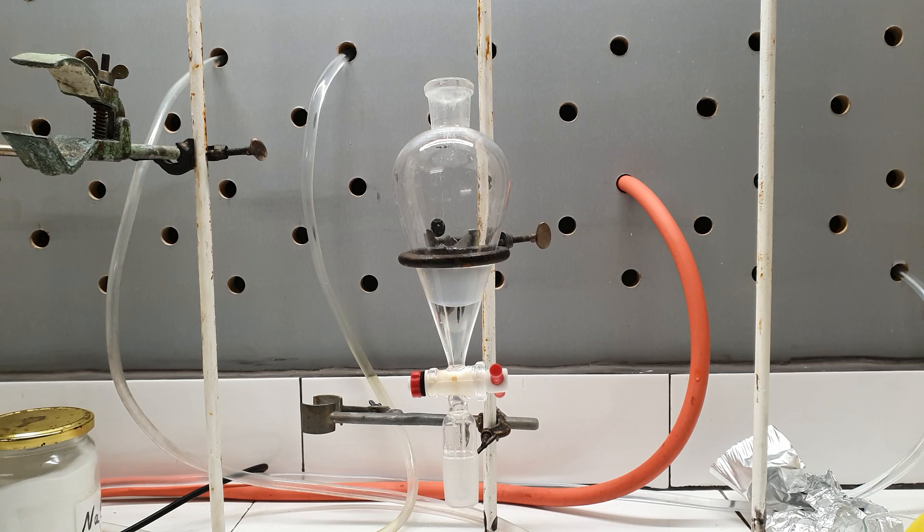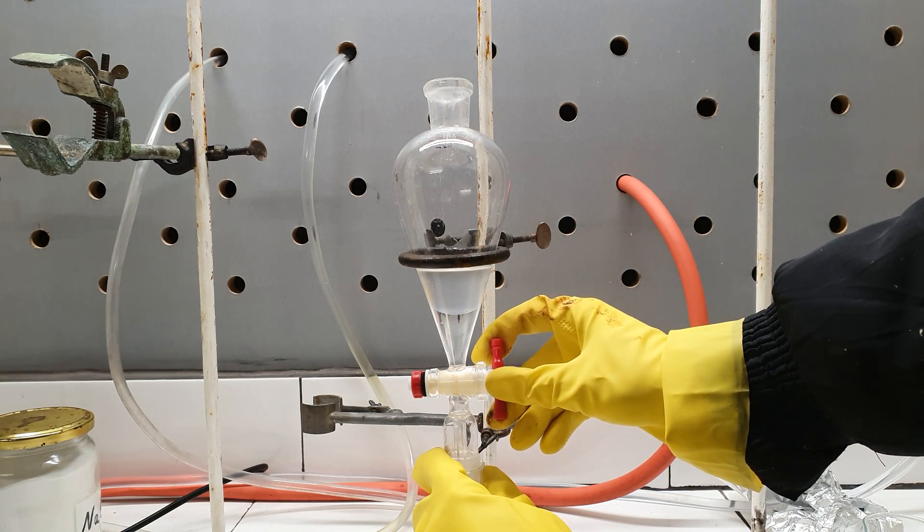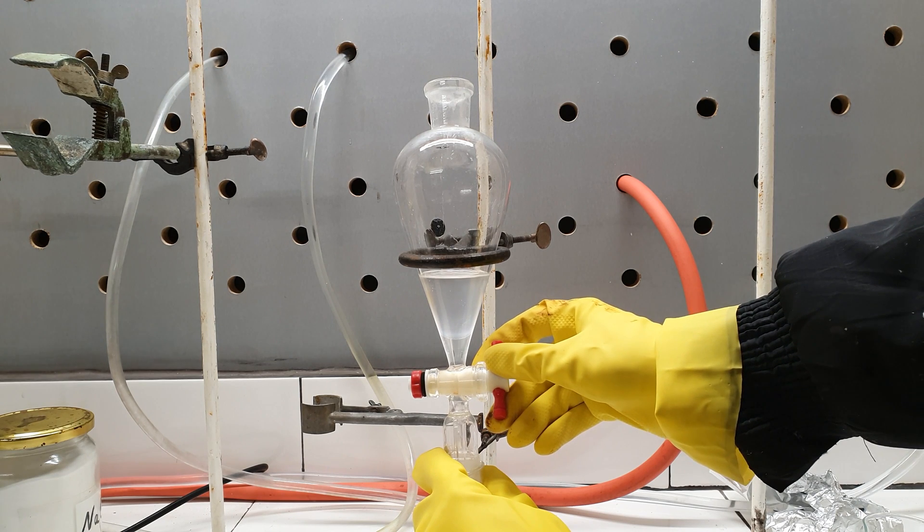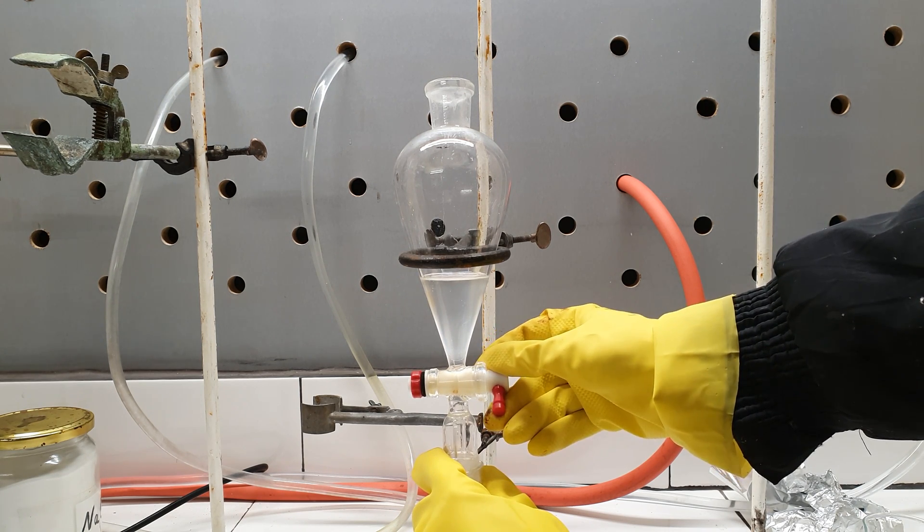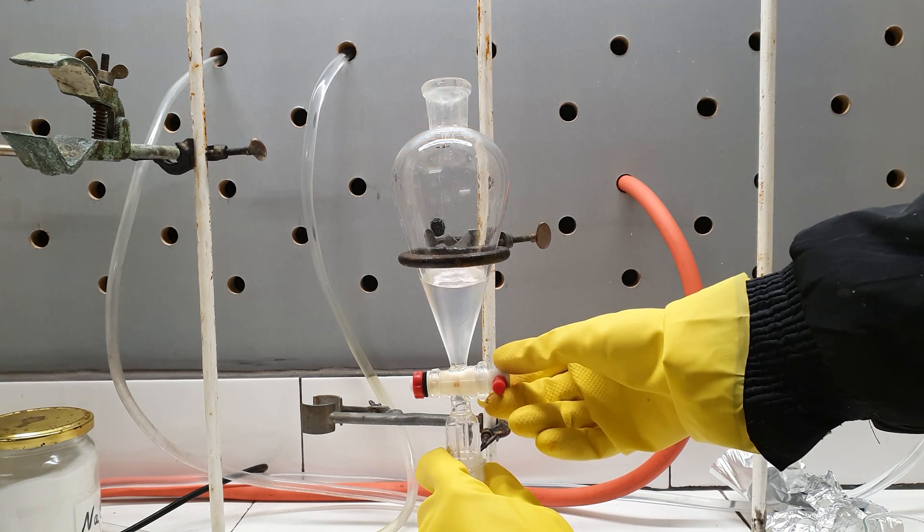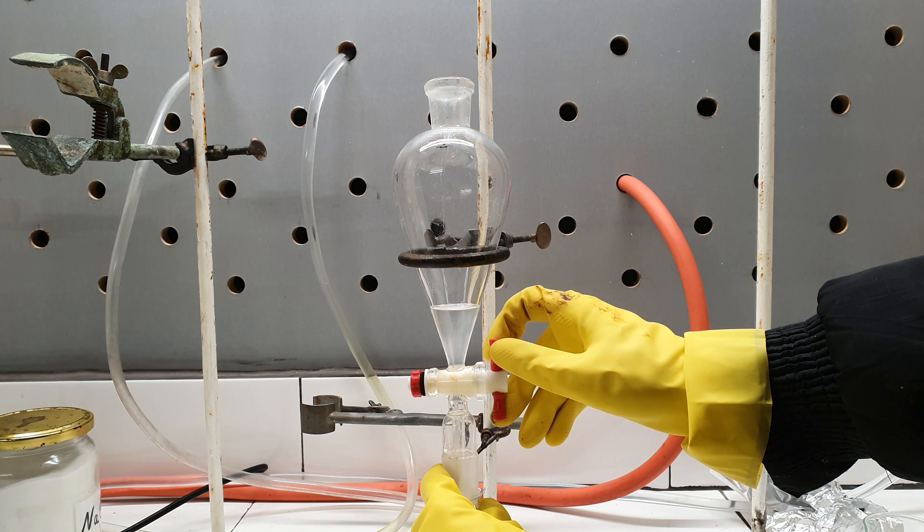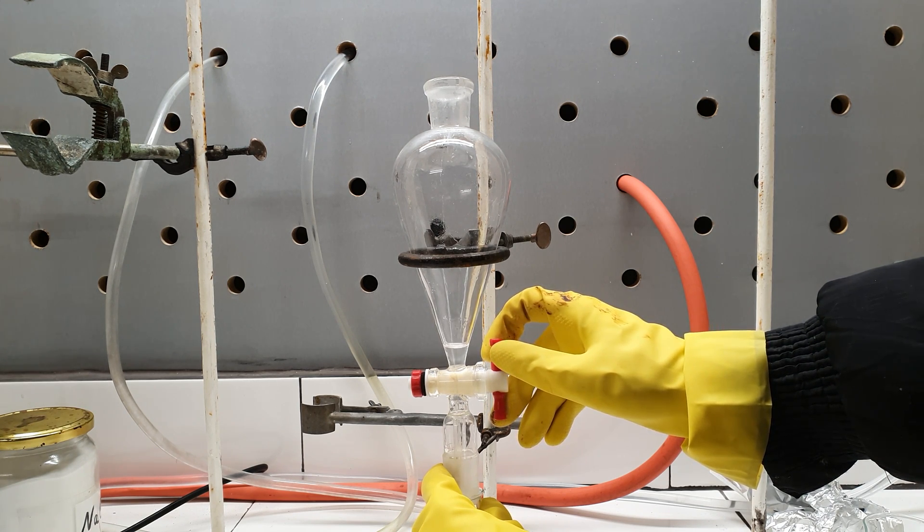Since saturated sodium chloride solution has a lot higher density than water, it is now the lower layer. I drained it and discarded it. The upper nitromethane layer was collected into a 100 ml Erlenmeyer flask.